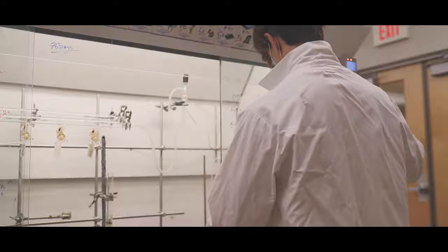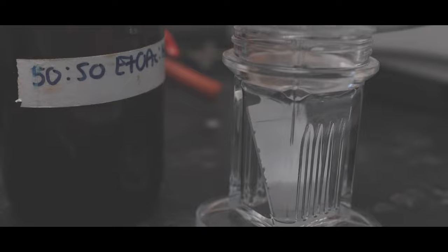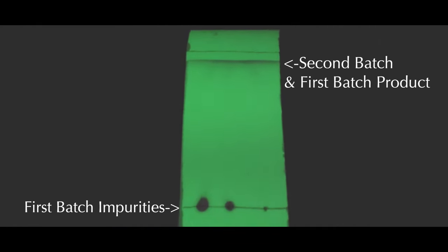To compare the product identities, a silica-based TLC plate was spotted by both the tainted blue product as well as the results of the adjusted procedure and then set in a chamber dipped with a 50-50 ethyl acetate hexane solvent.